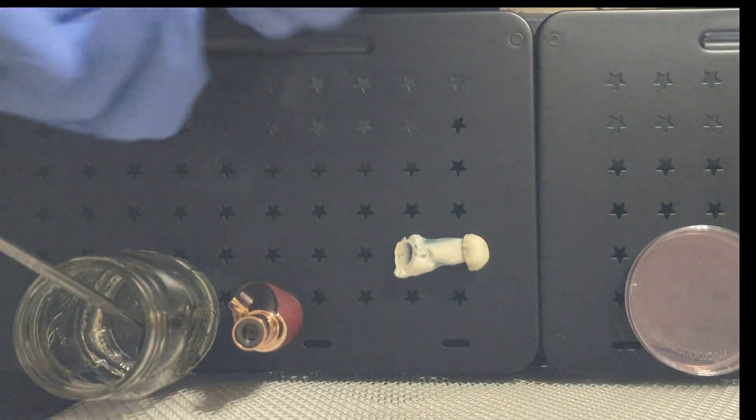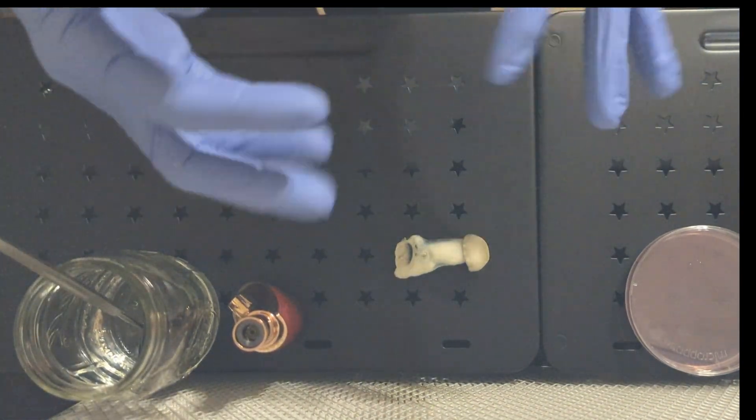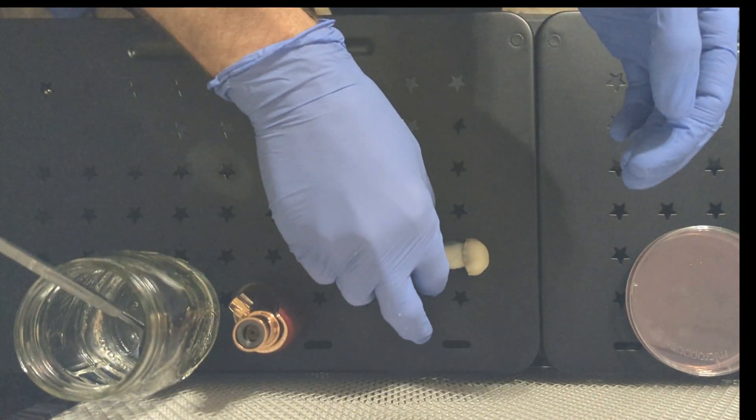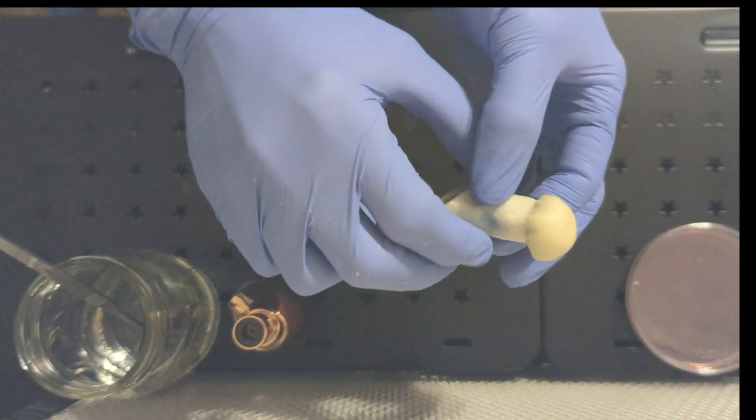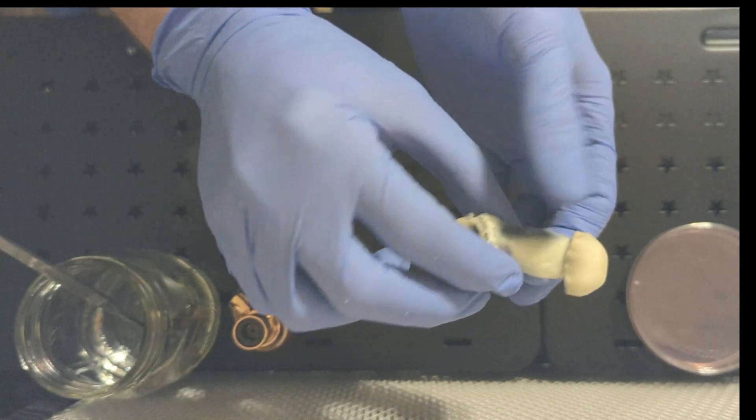You want to try and get them before they open up all the way so they're not covered in spores. The earlier you clone them the better. You just want to make sure they're thick enough that you can rip it in half.